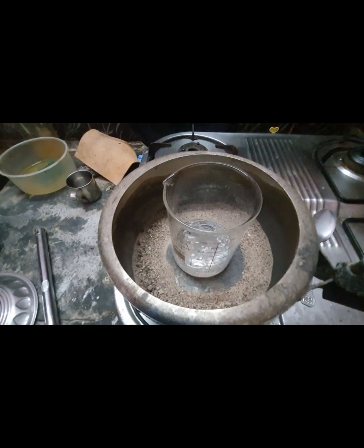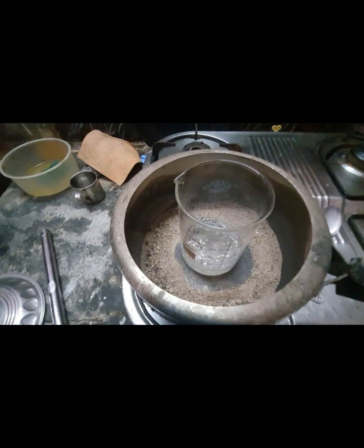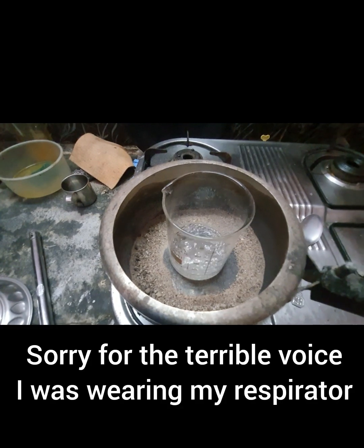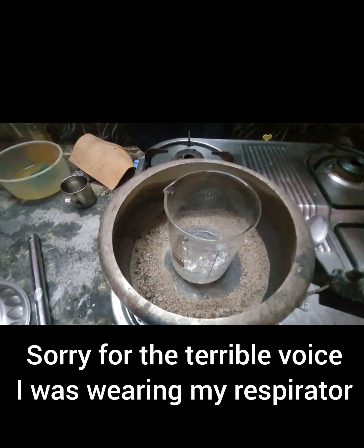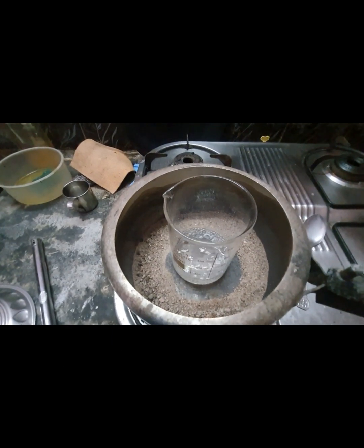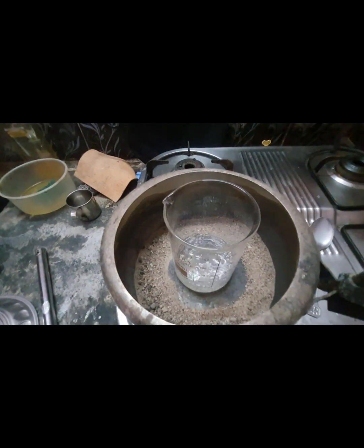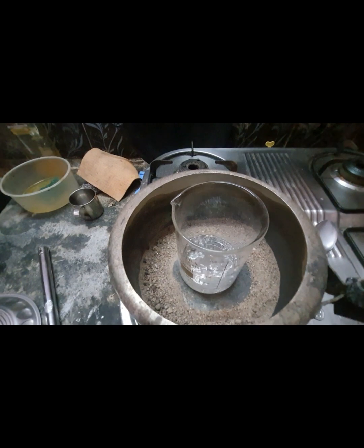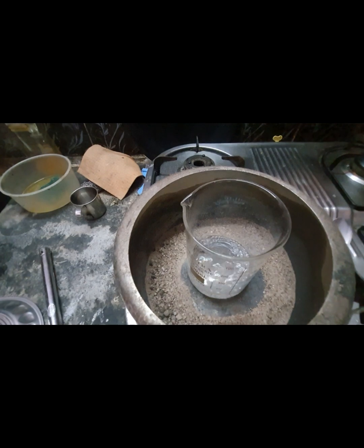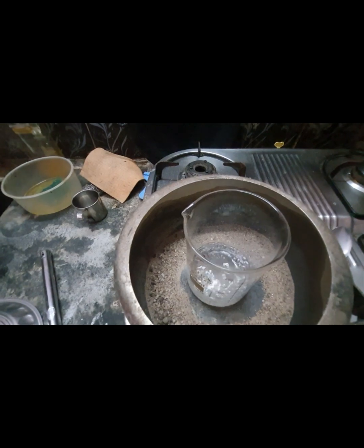So what I want you to do right now is lower the heating and wait until almost all the water is boiled out, and you can see a bit of crystallization starting to take place. At that time, turn off the heating and transfer this beaker under a dehydrator or an oven, and bake this until all the water has evaporated and until you get some solid crystals. I don't have a dehydrator actually, but I made one. So after all the water has dried out, we can test it.